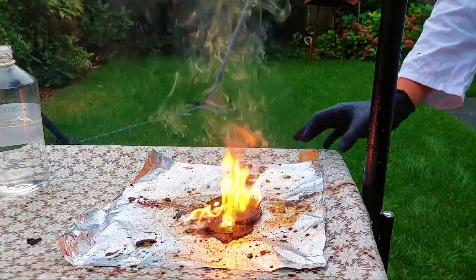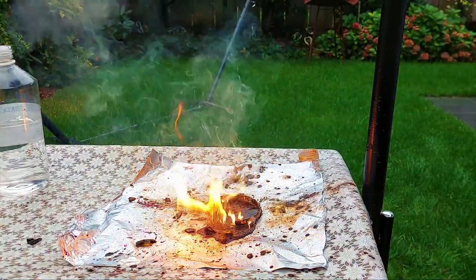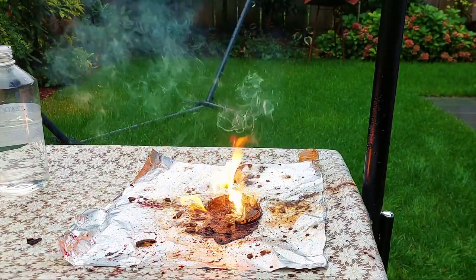That was much more vigorous than anticipated. It reacted very explosively and the bang wasn't picked up very well by the microphone. Let's look at that again, this time in slow motion.